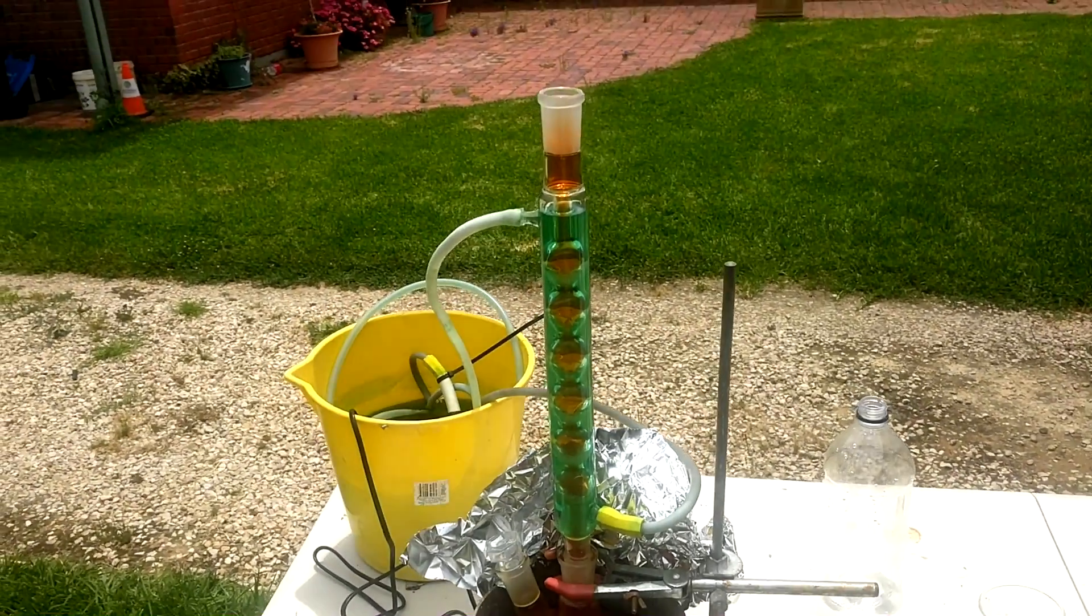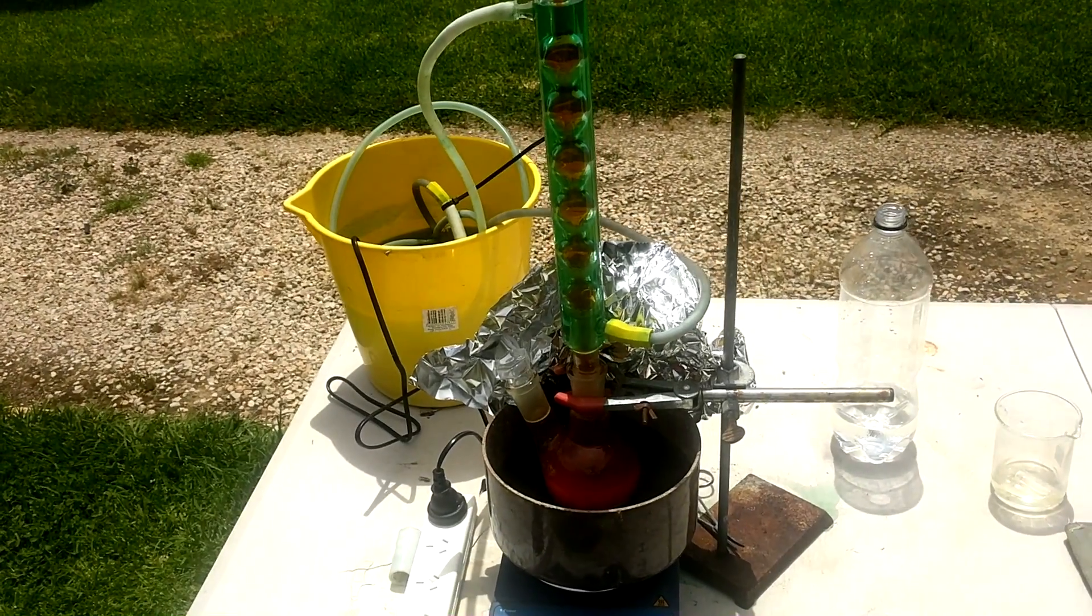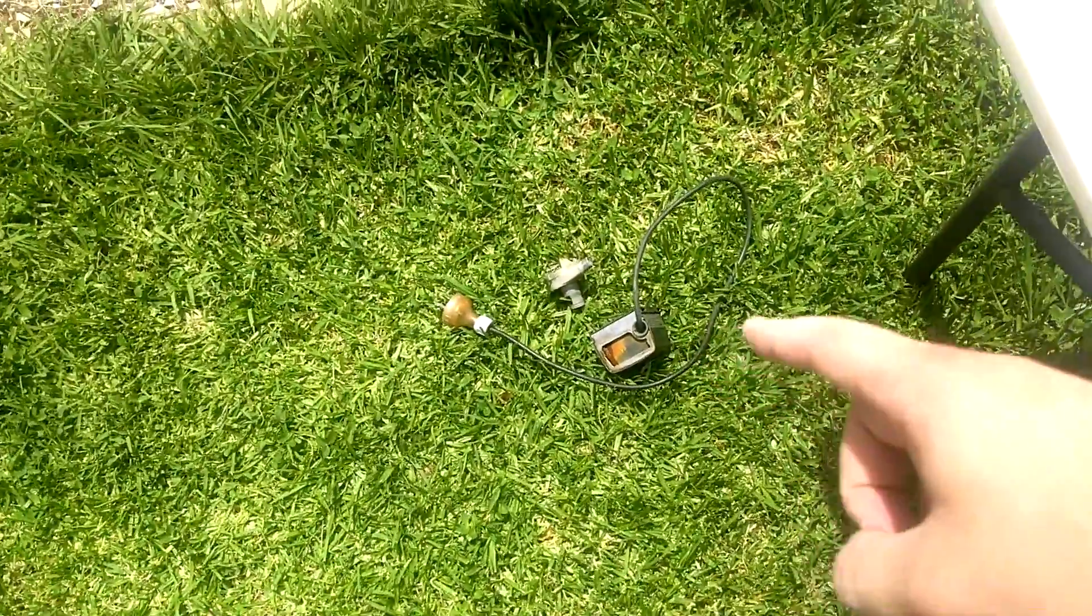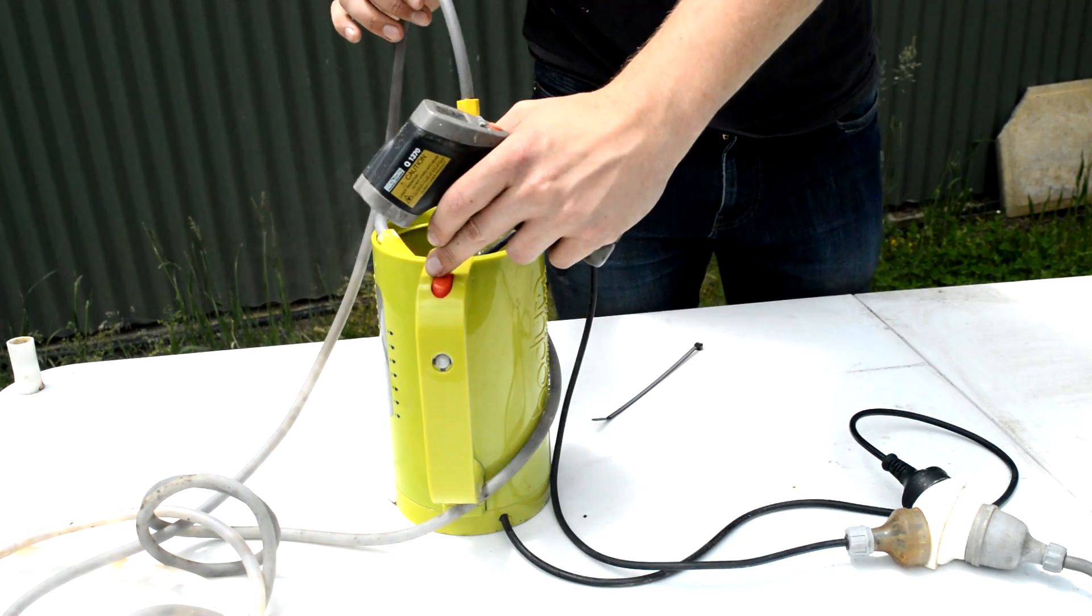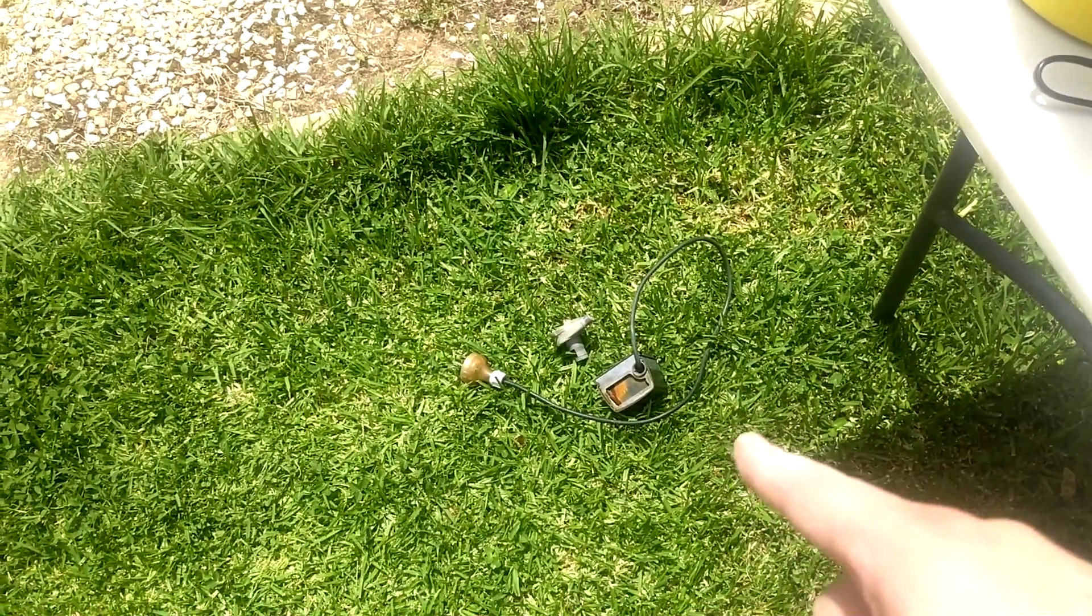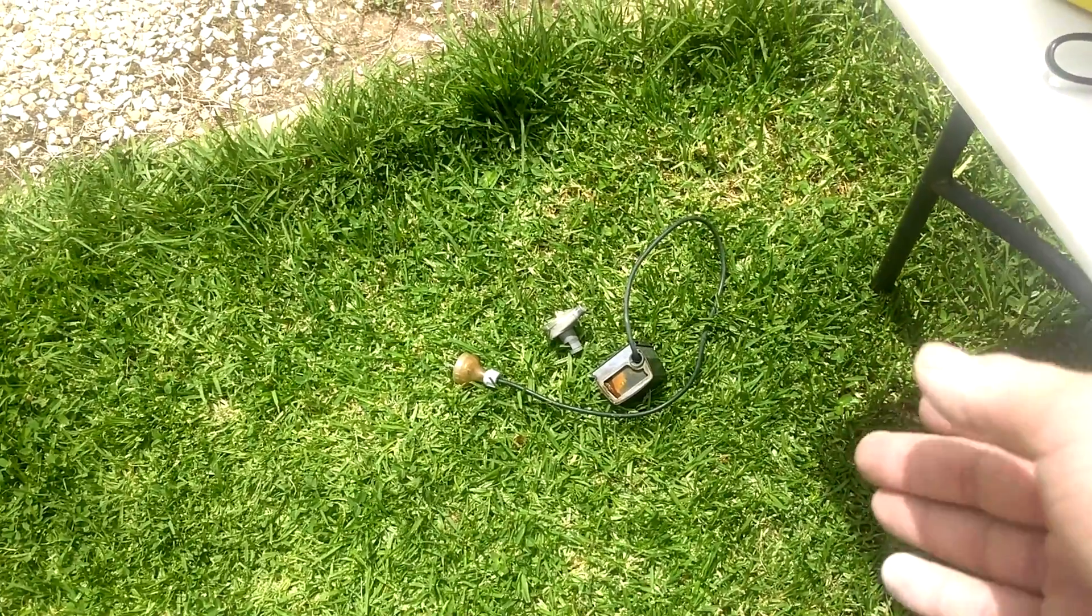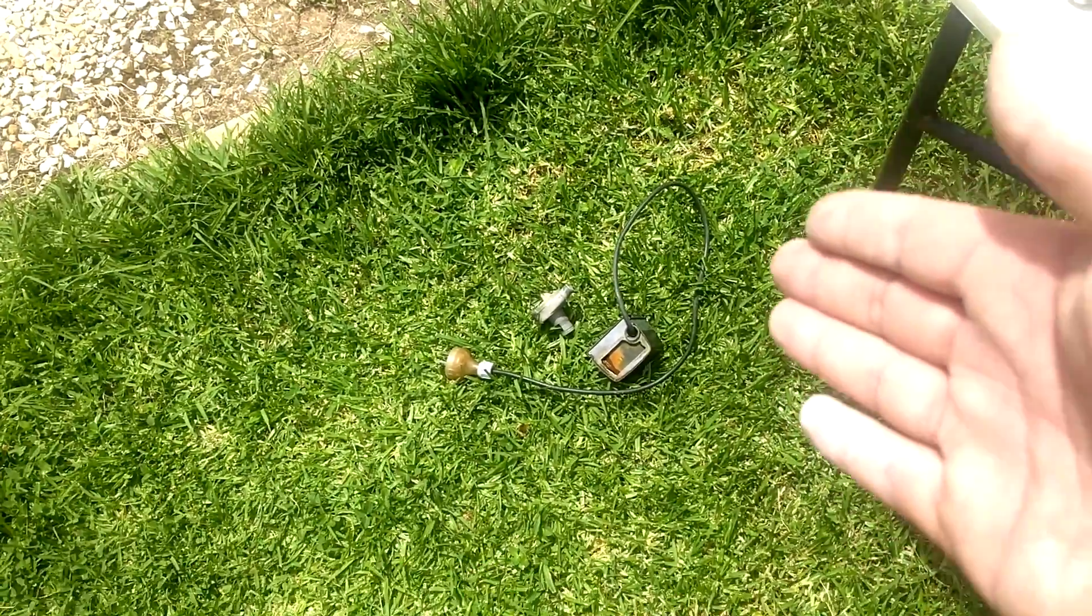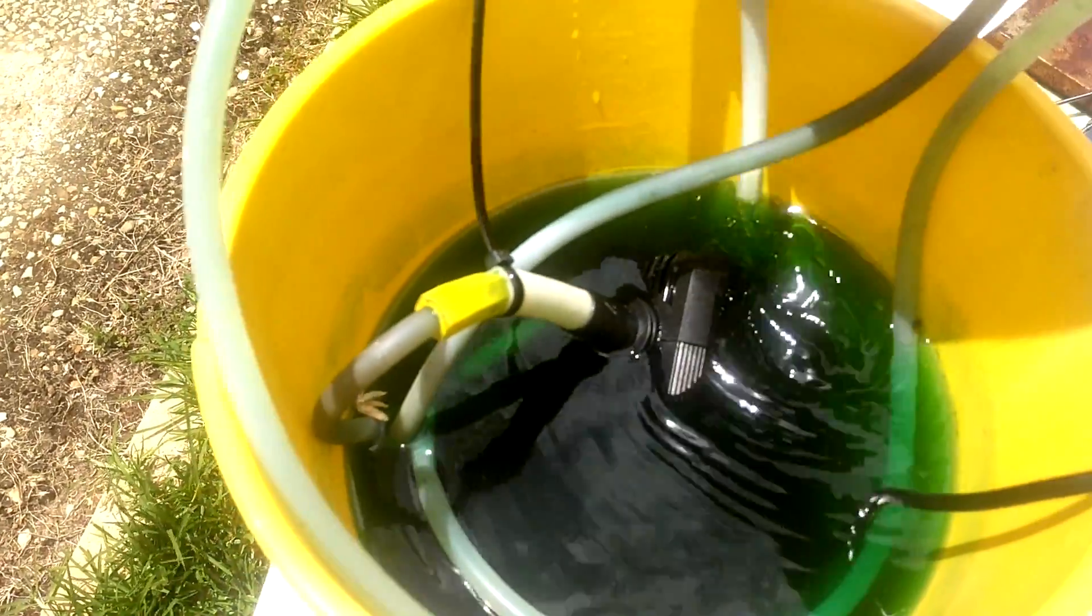The condenser water is green. It's green just as a party trick, I just thought it would be cool, and make it clear what was the condenser water and what wasn't. I had to change pumps. I thought it was a really great idea putting that pump in the kettle. But it really did actually warp the plastic so it's kind of dead. Which is a bit sad, it's been running as a pump for nearly 12 years continuously. Used to run a fish pond pump. Ran all that time and just didn't survive being put in the kettle. That's fine, I bought a new pump. It's a little bit more high powered so it tended to splash the water around a bit. But I've modified it so a bit leaks out so the water runs at a reasonable rate.